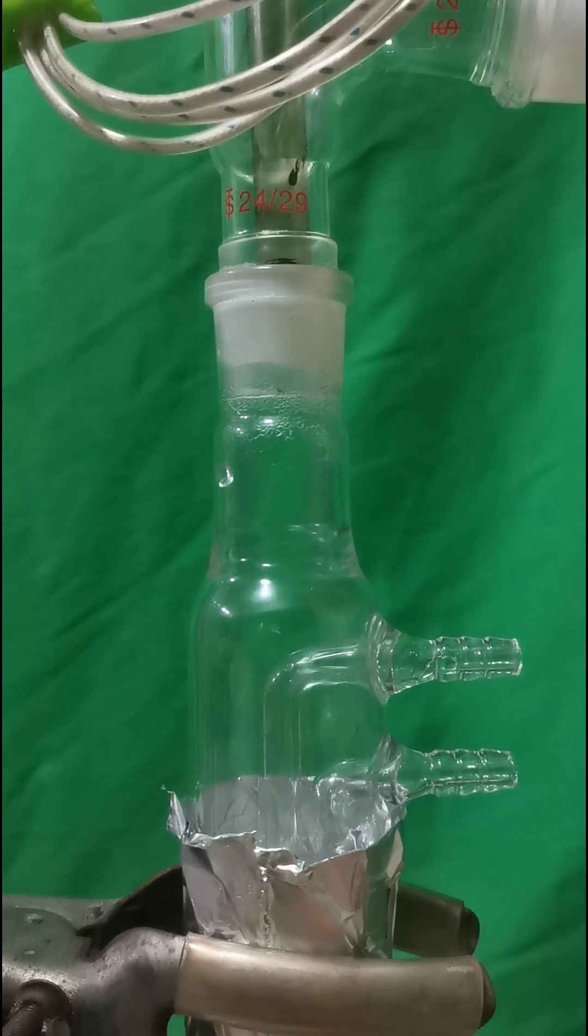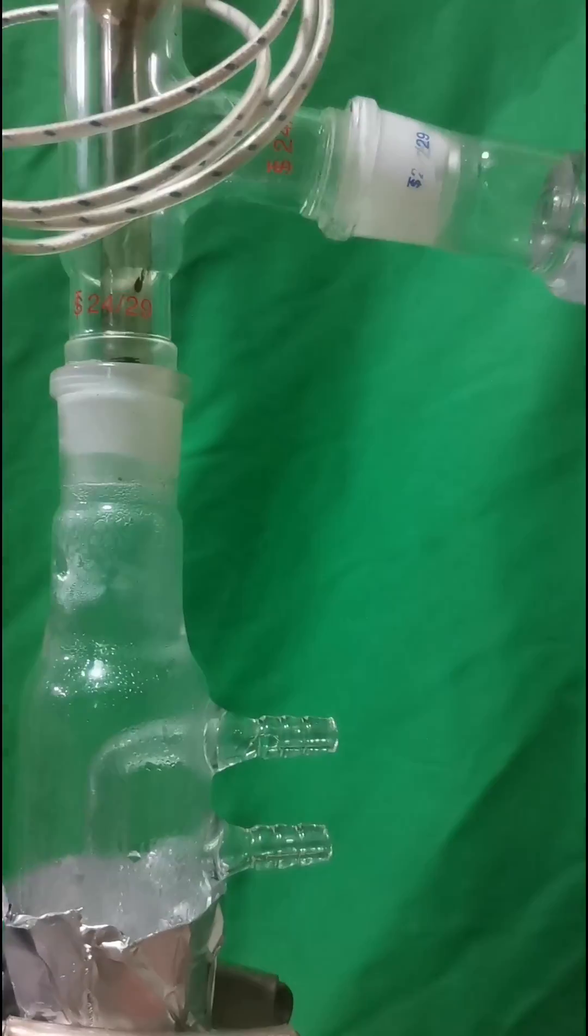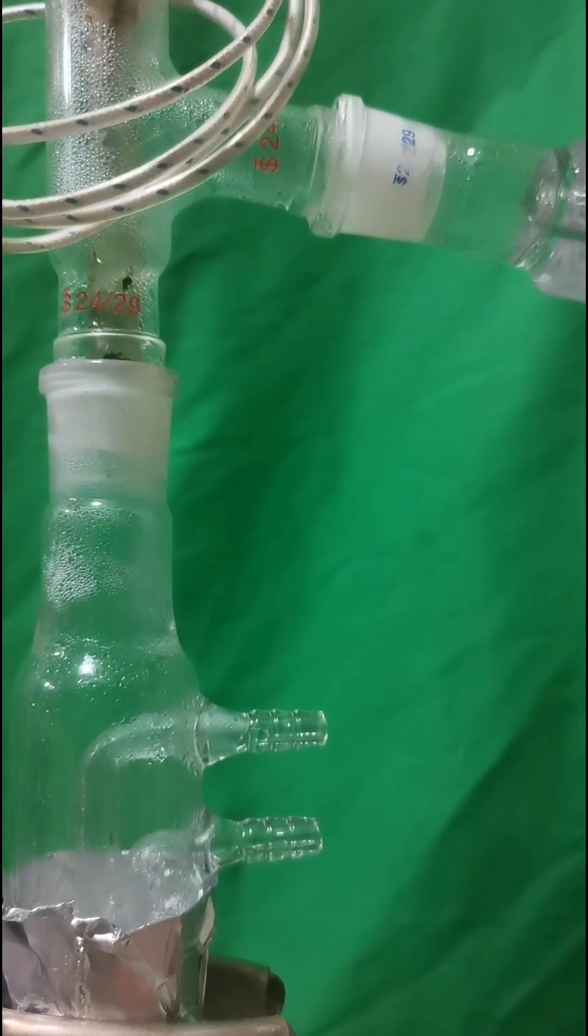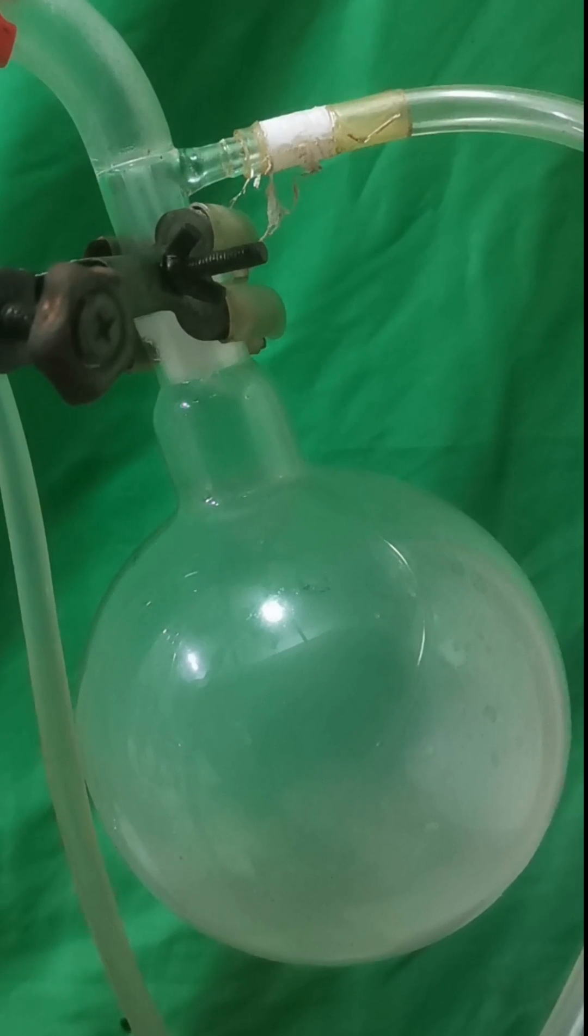As you can see, the reflux condenser can also be used as a distillation column. Some liquid appears. It should be water and a bit of hydrogen peroxide.